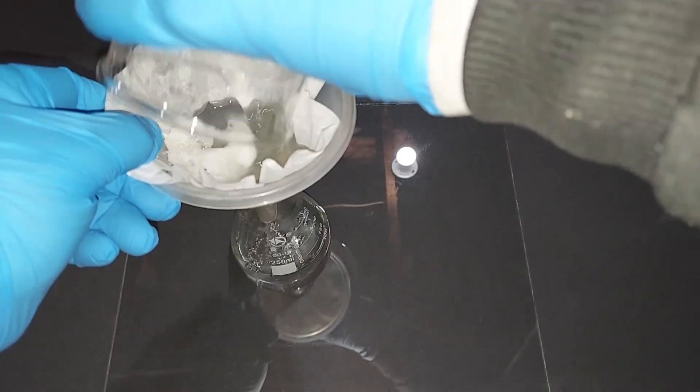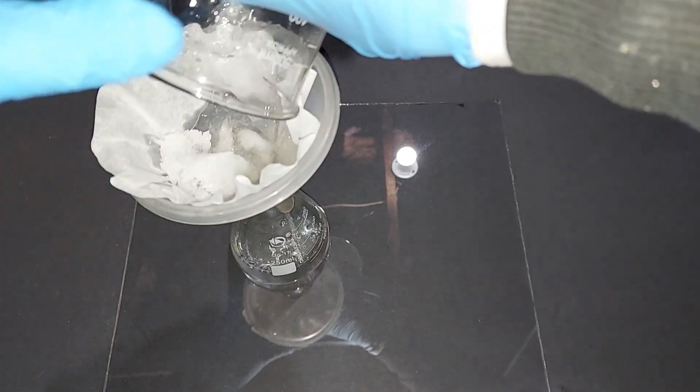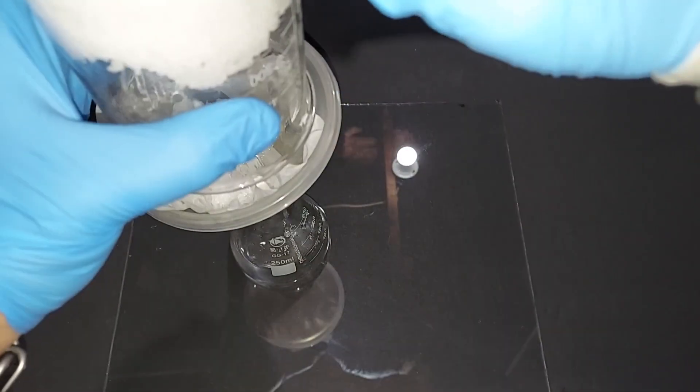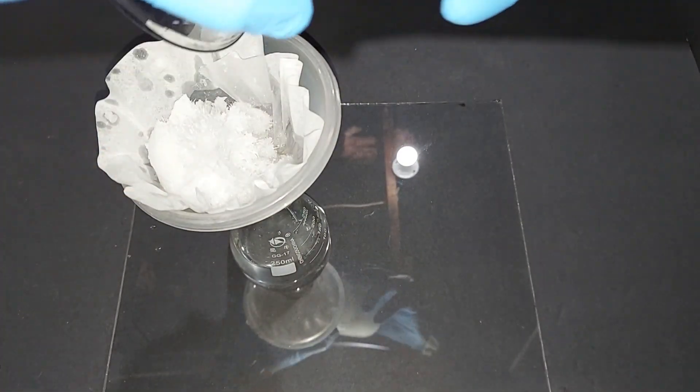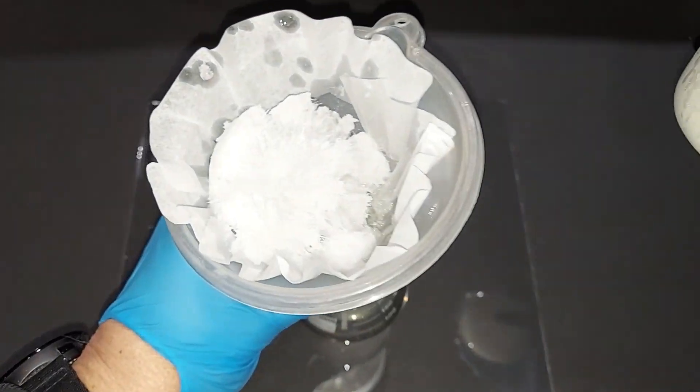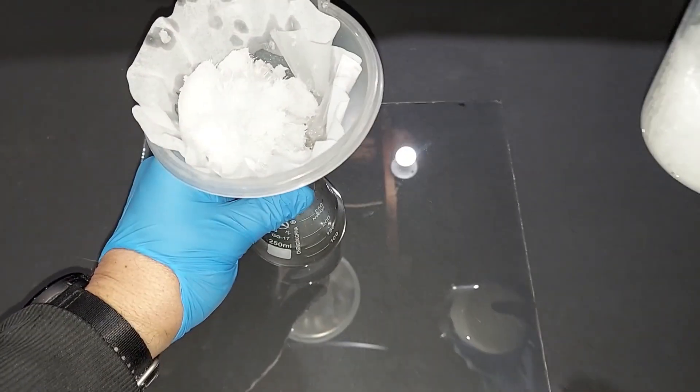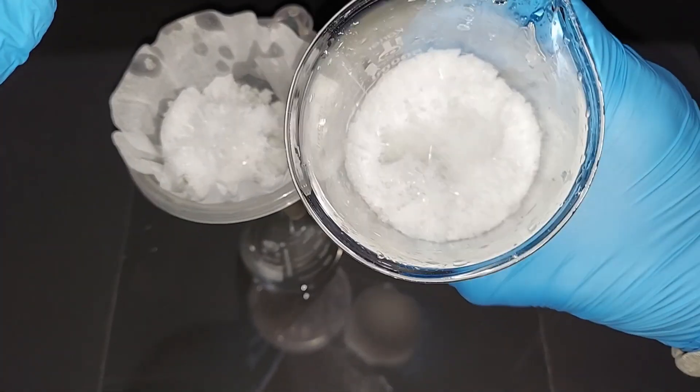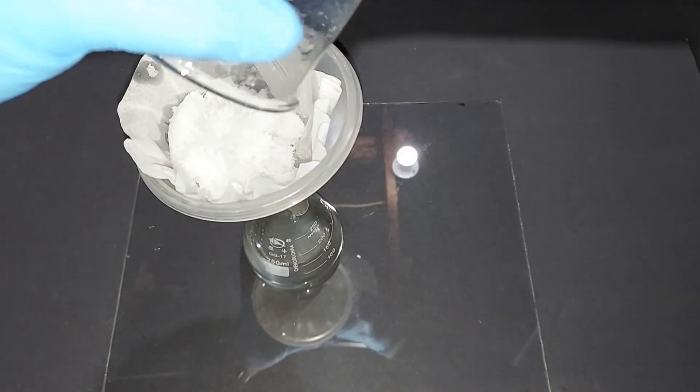I didn't expect this. Come on. These needle-like crystals you can see here, I'll bring it closer, are clearly potassium nitrate.